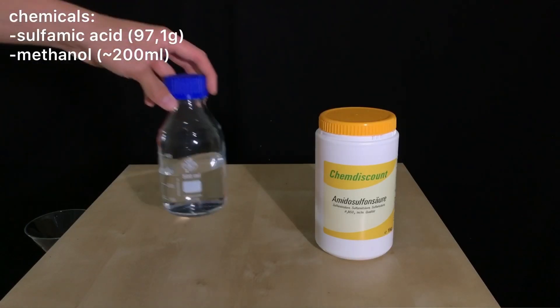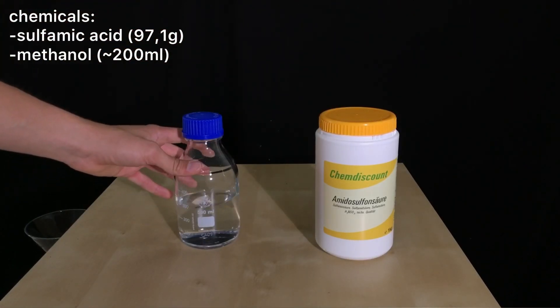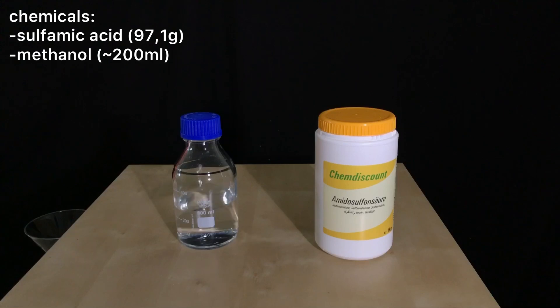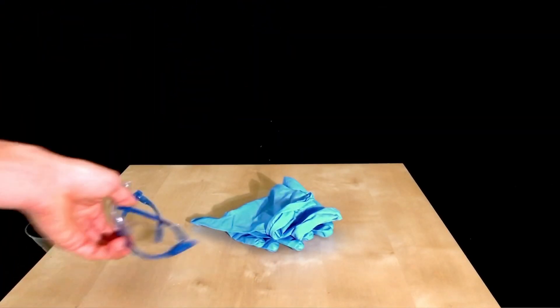Welcome back everyone. Today we are going to make ammonium methyl sulfate. For this we are going to use 97.1 grams of sulfamic acid and 200 milliliters of methanol, which is a huge overkill.